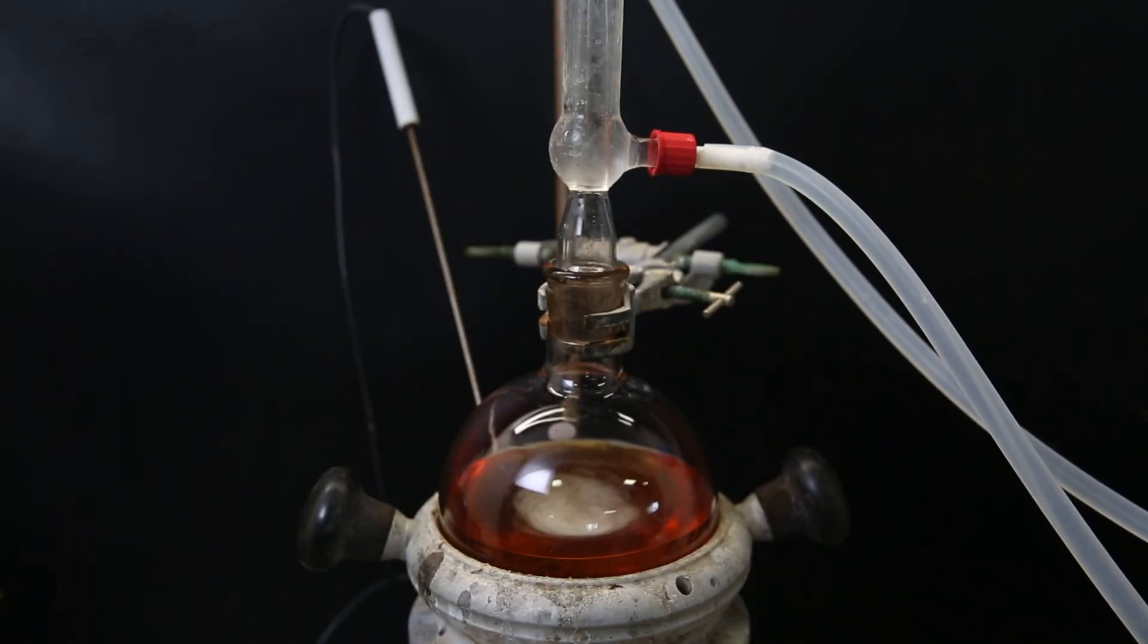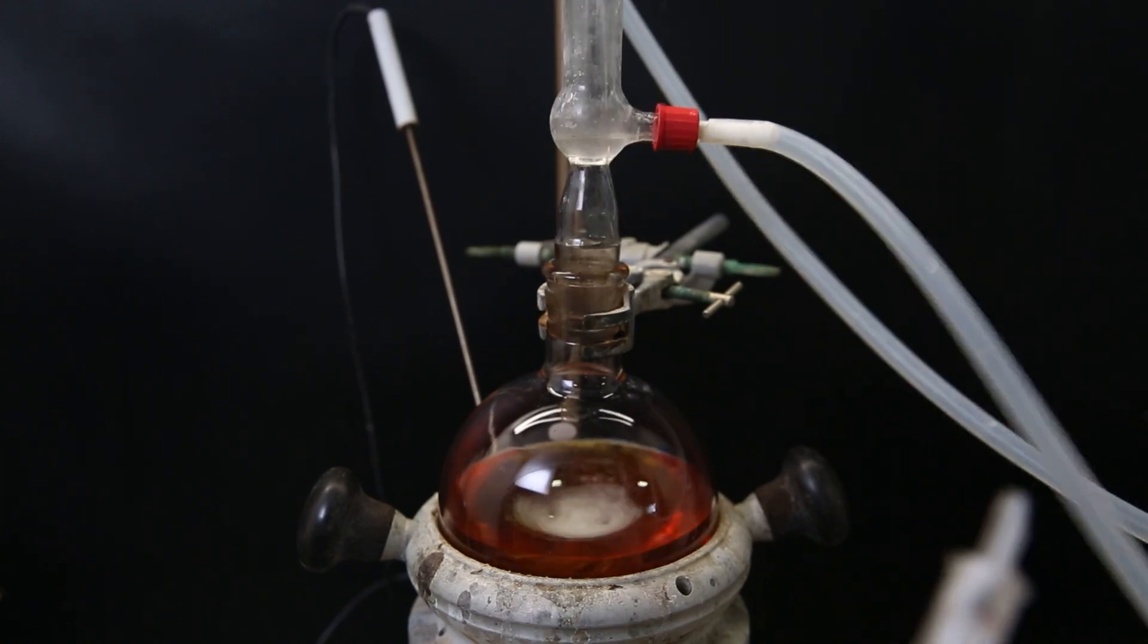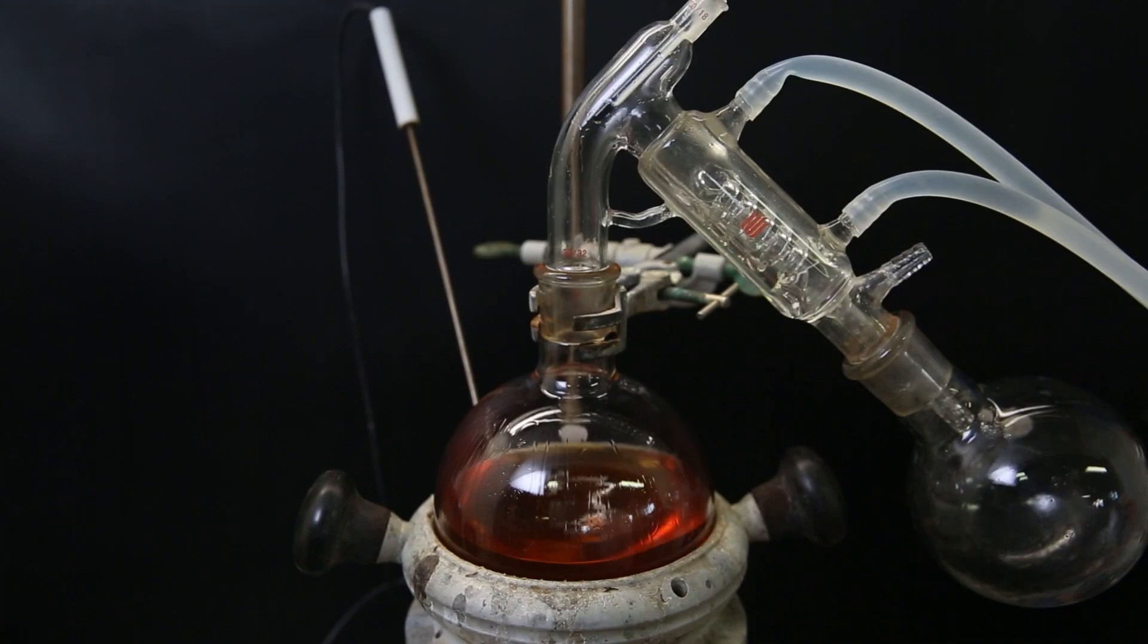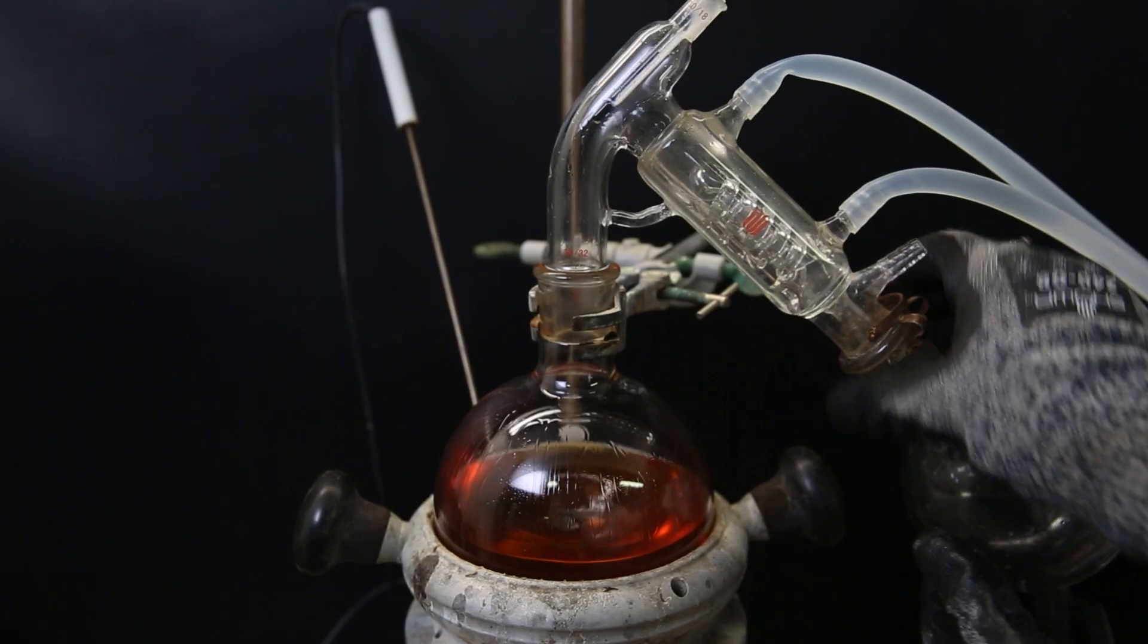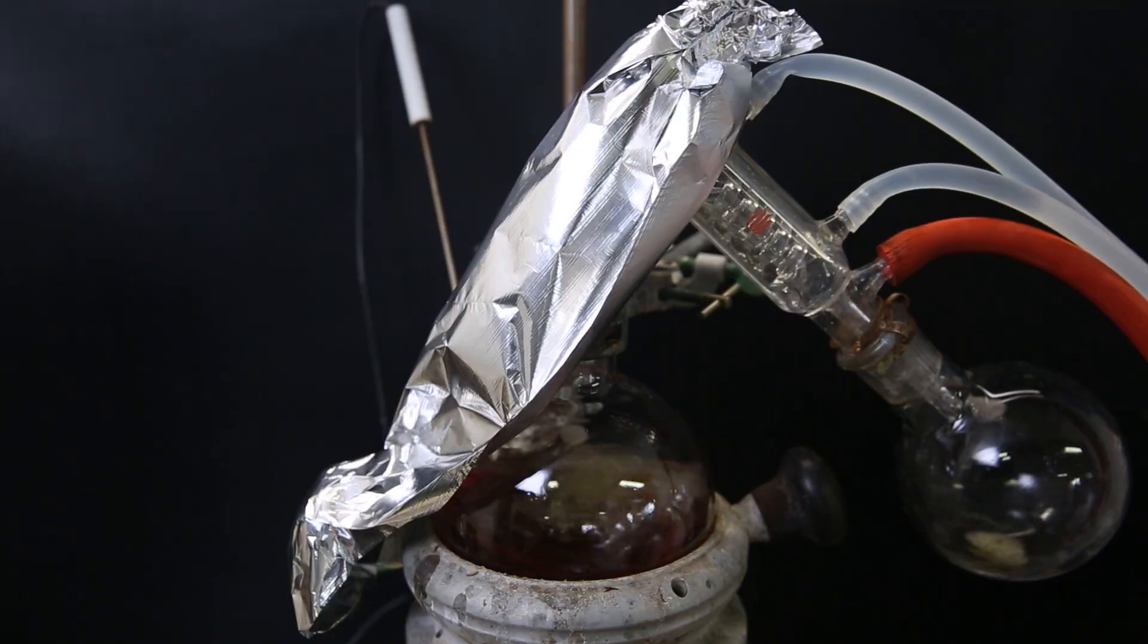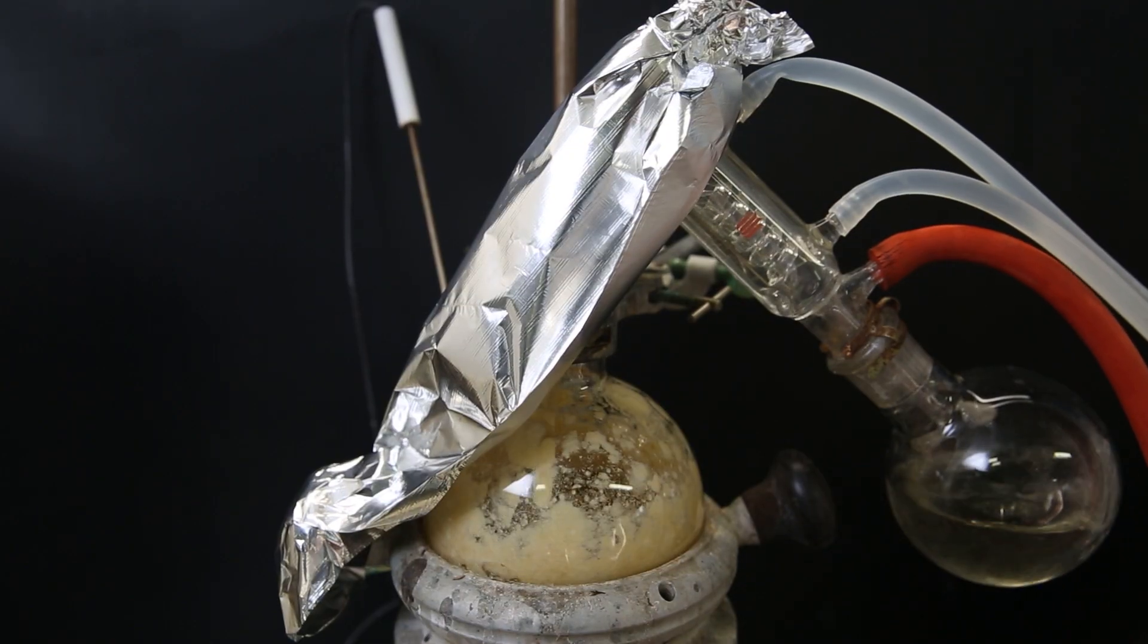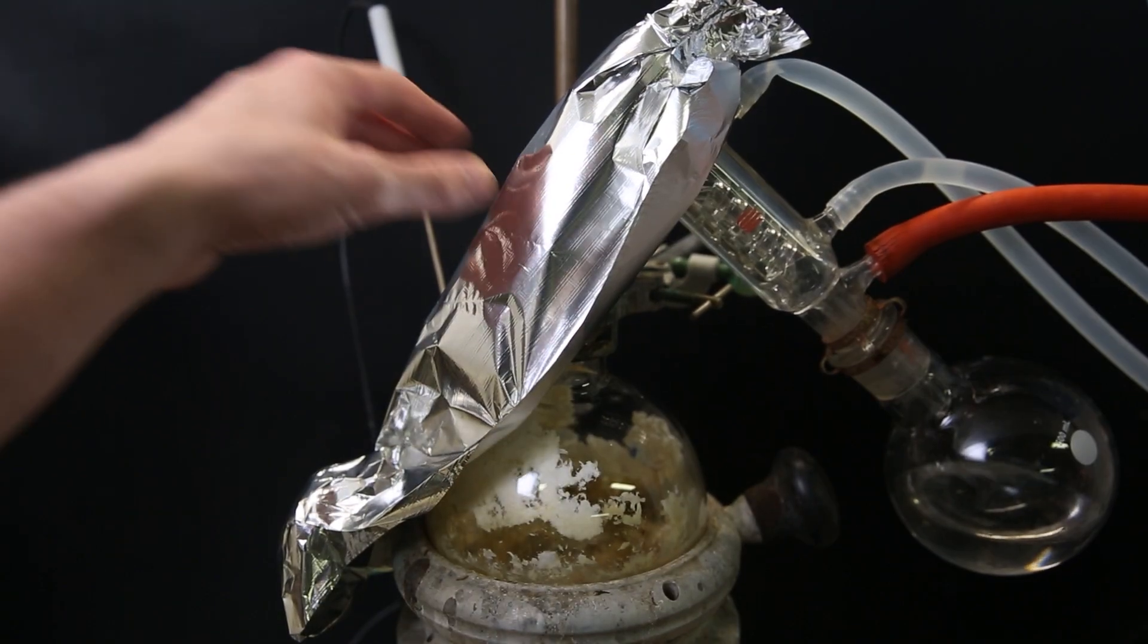When I return the next day, the mixture looks the same, but the reaction should be finished. I immediately remove the condenser and quickly replace it with a short path distillation apparatus. I then let it cool down a bit and vacuum distill over all the solvent. I pull out the last bit with a stronger vacuum, and what is left behind is a yellowish solid.